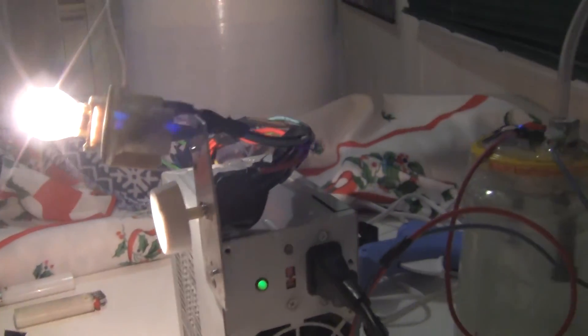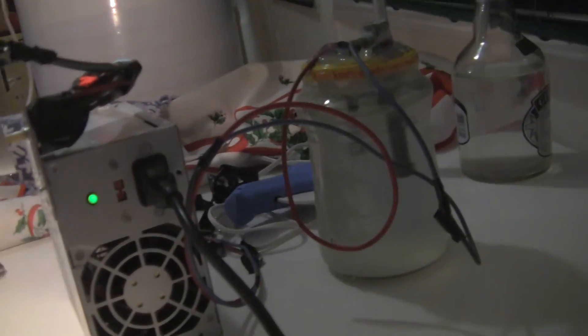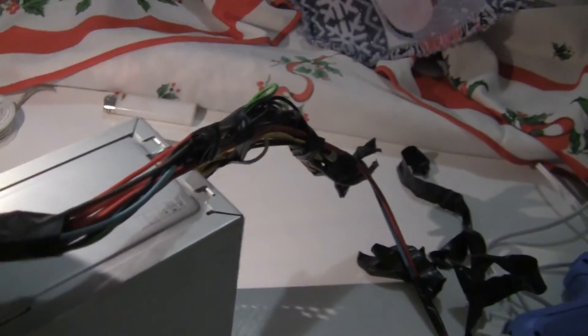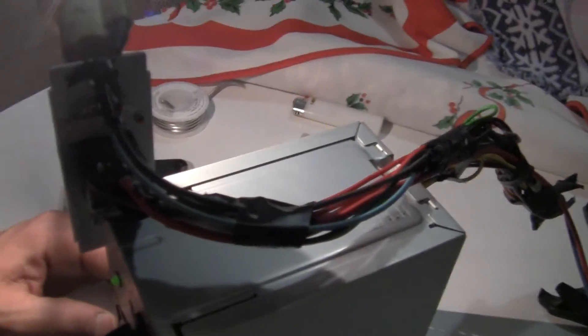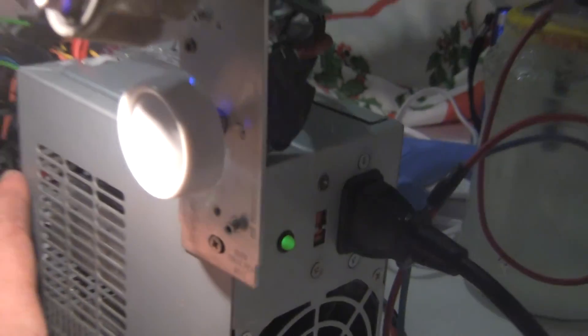The freaking bulb's hot now. Should have pulled that out sooner. I don't know if you can actually see it or not here. Stop playing with the freaking zoom. It's basically just bolted in through one of the screws on the case itself, just kind of hold it there.